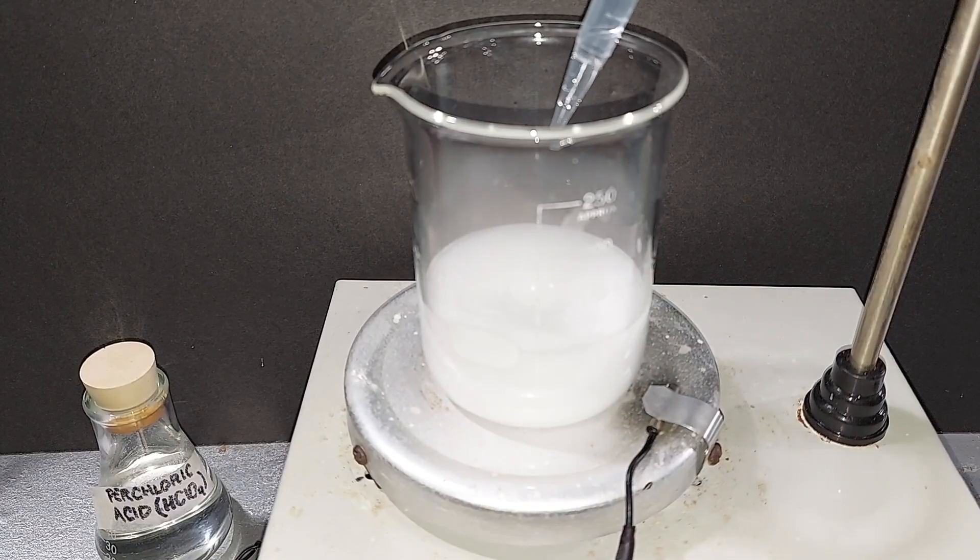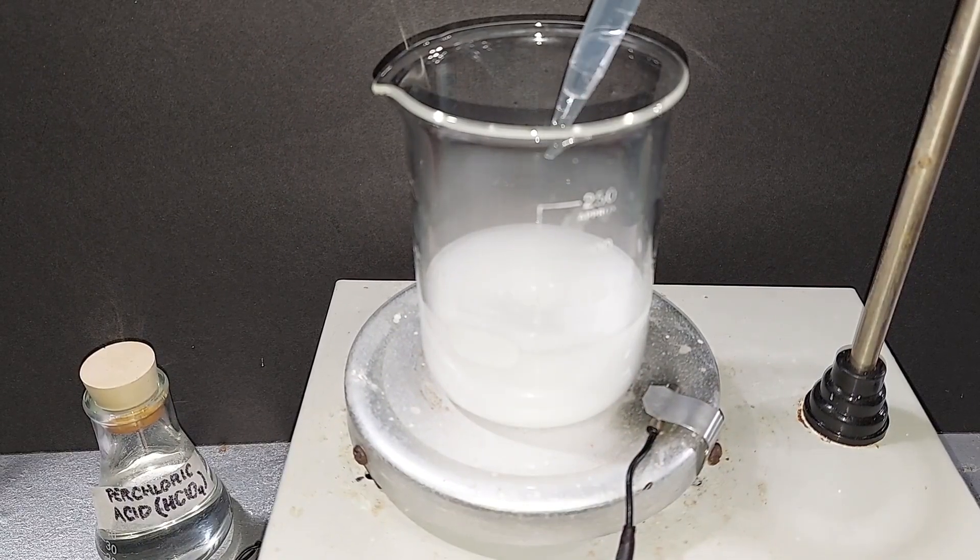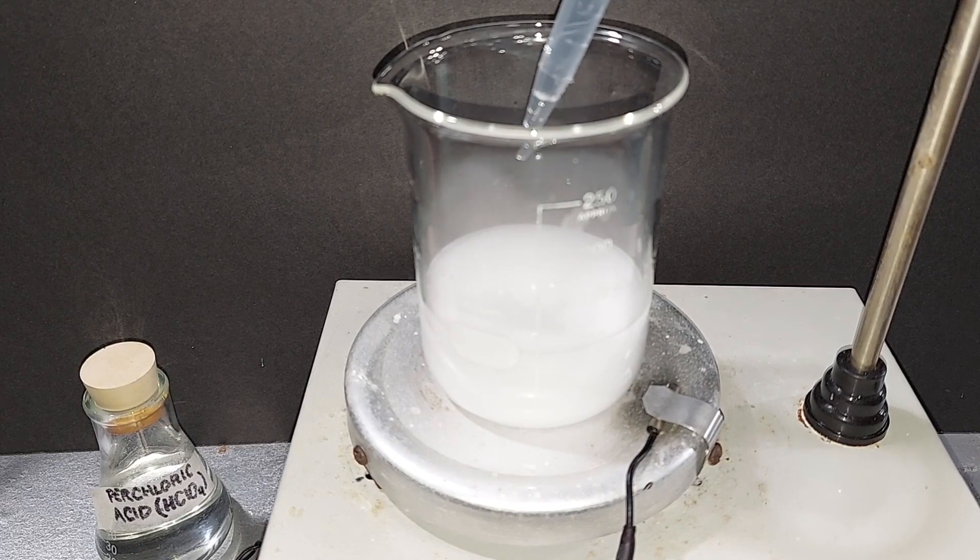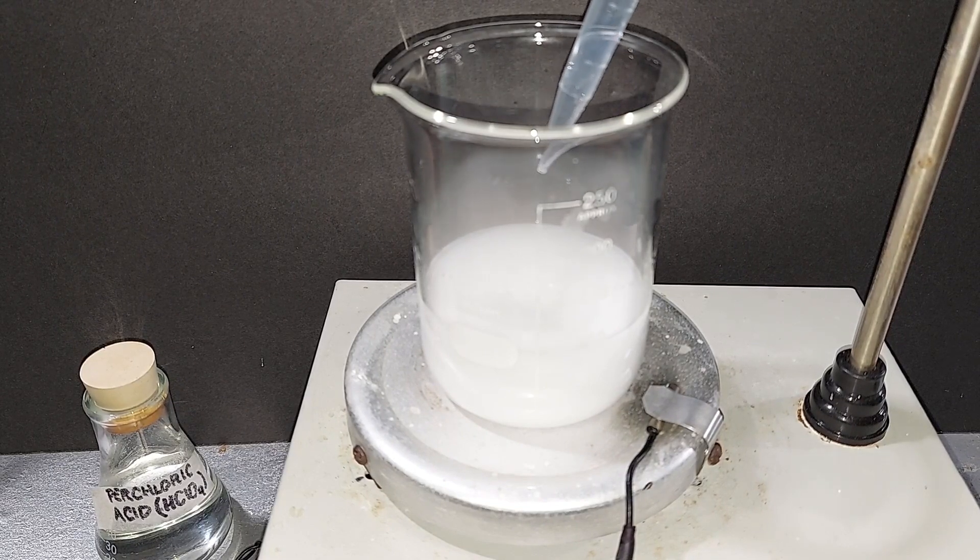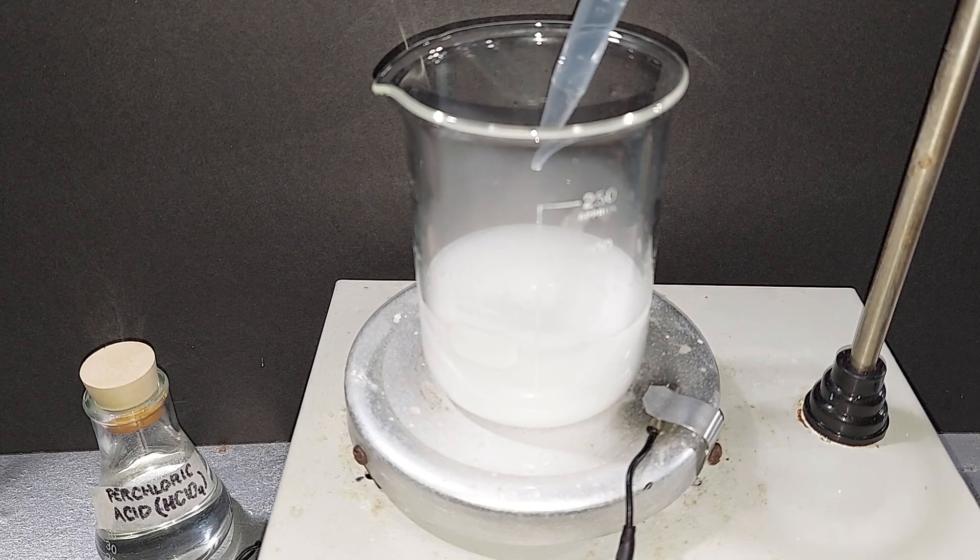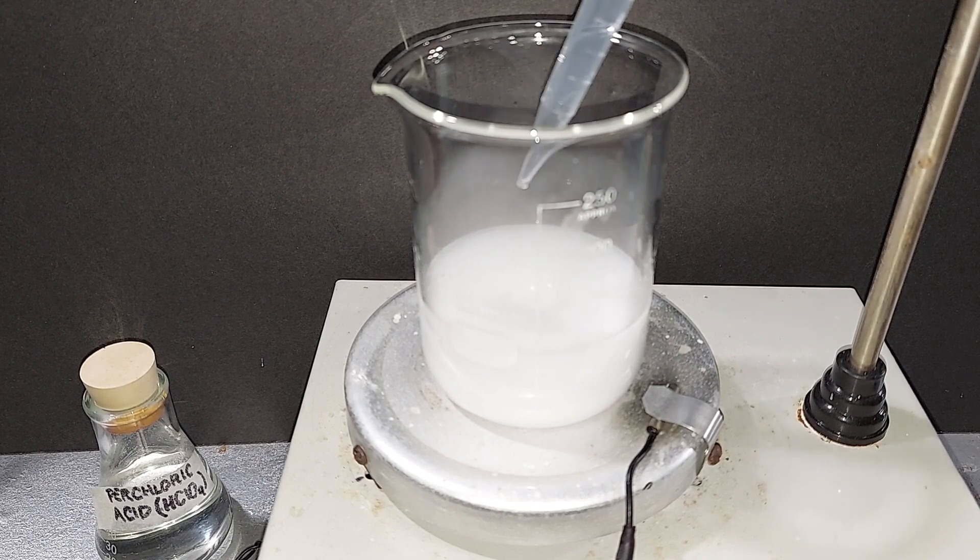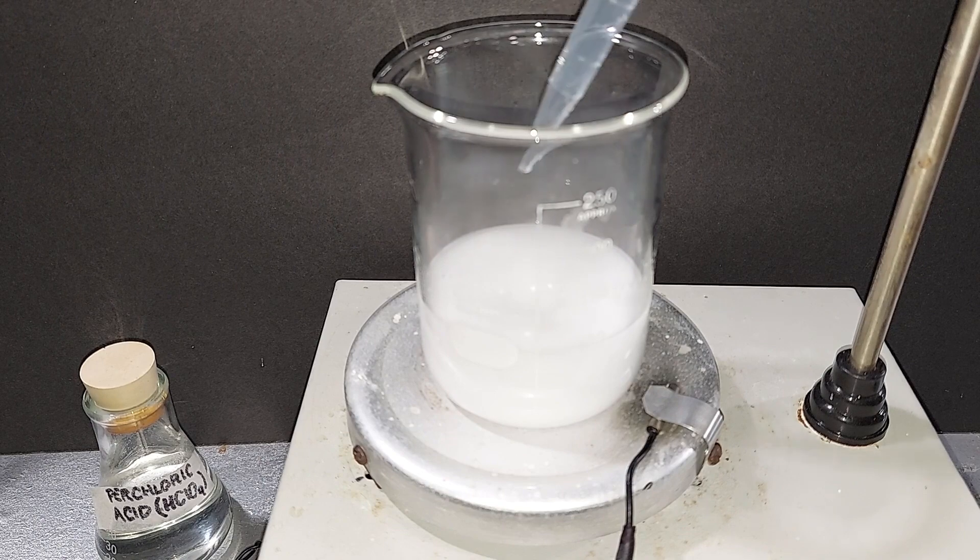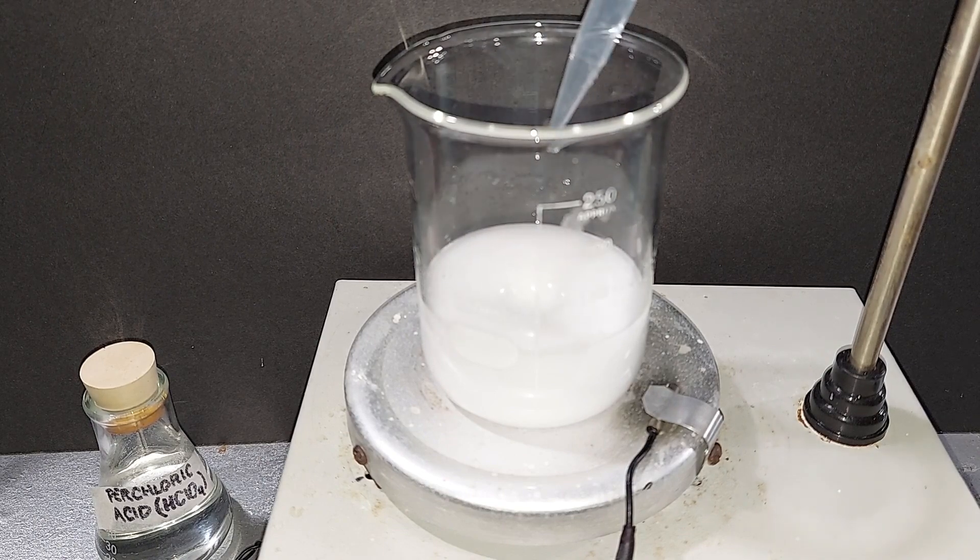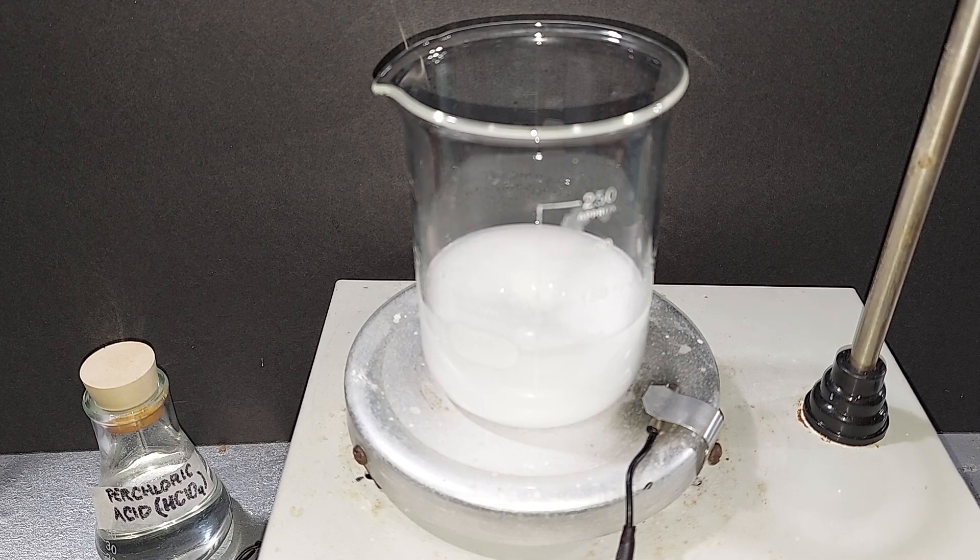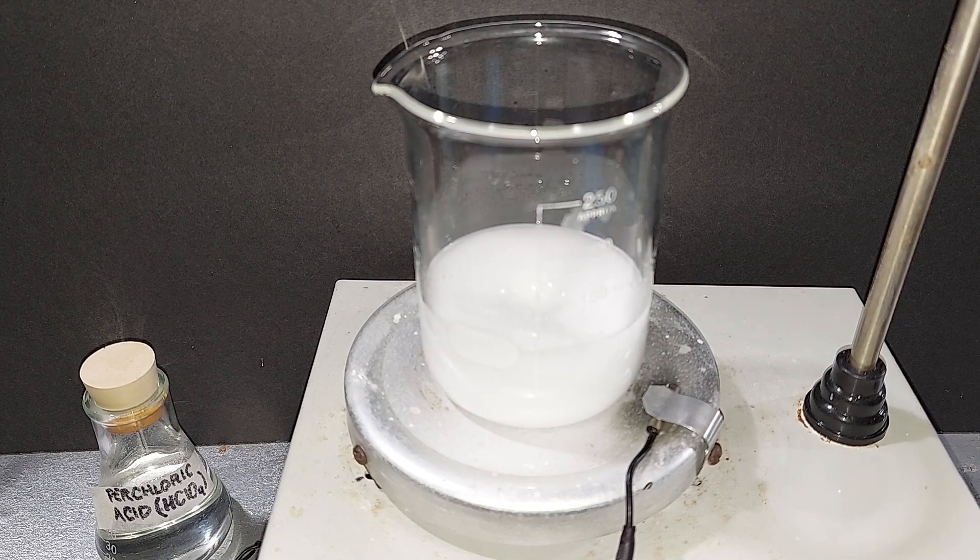Just finishing this up. I did not use any heat in this part of the process but as you can see that's some steam forming on the walls because this is very exothermic, which I already talked about. Yeah it's pretty hot. I push some air in there, you can see this.